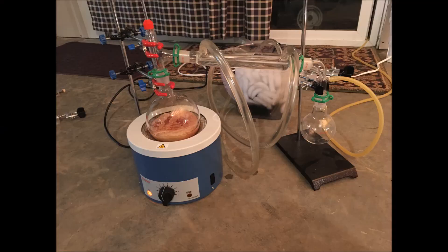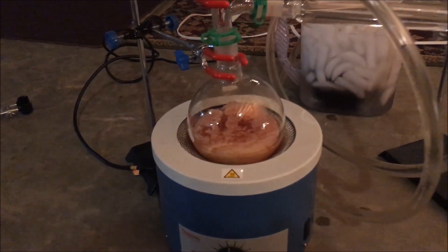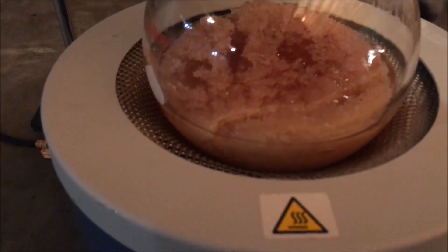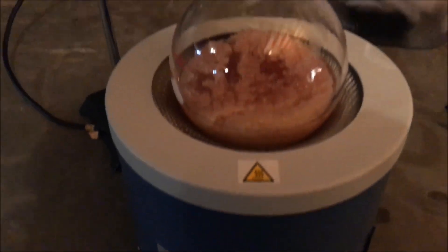After all the sulfuric acid was added, I set up for a distillation. I connected a hose that ran outside, so I wouldn't be breathing in nitrogen oxide gases. Heat is applied to the reaction flask, and then you'll see nitric acid slowly distilling off and collecting in your receiver flask.